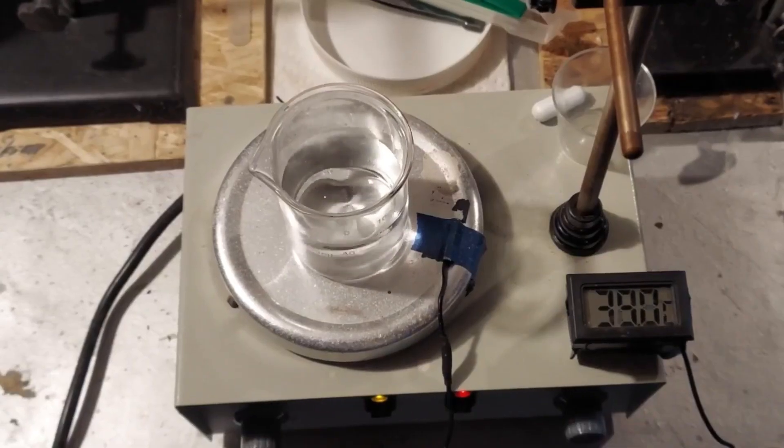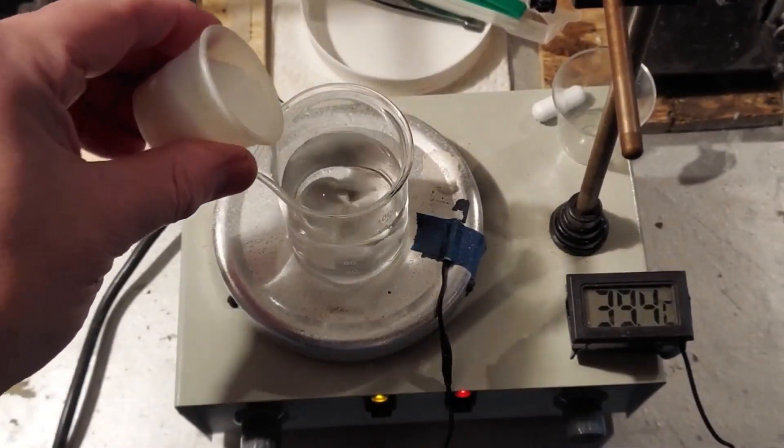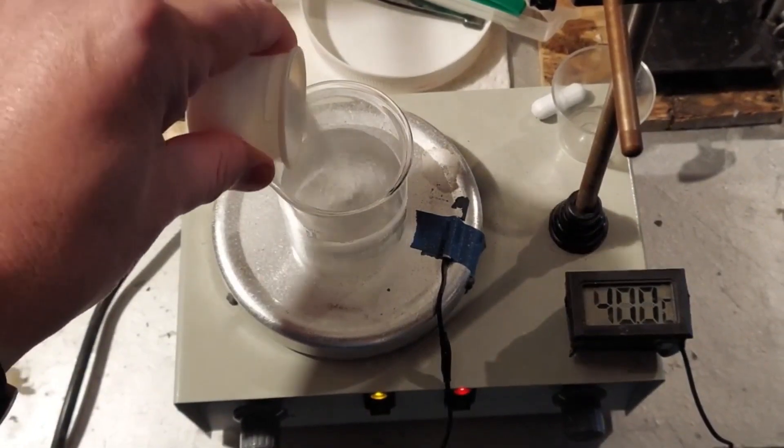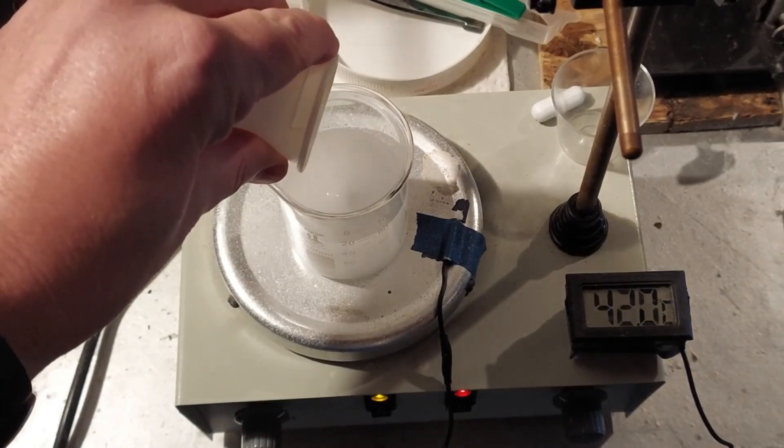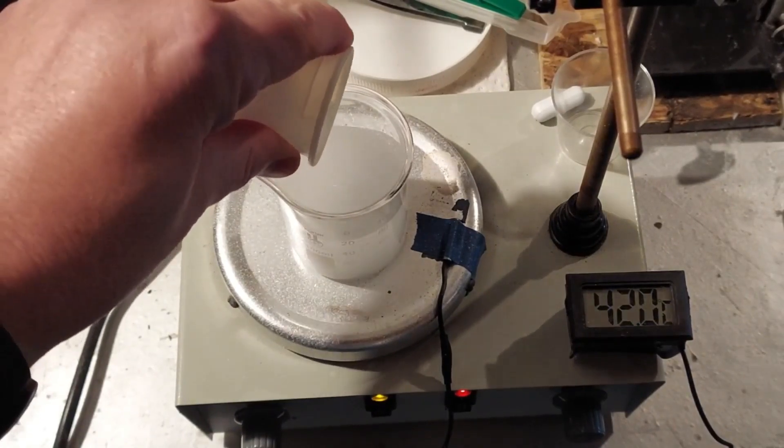As the water heats up here, I'm going to add most of this because it dissolves really well in water, as I said a couple times. The temperature reading there is the temperature of the hot plate, not the water. But the water catches up pretty quick.